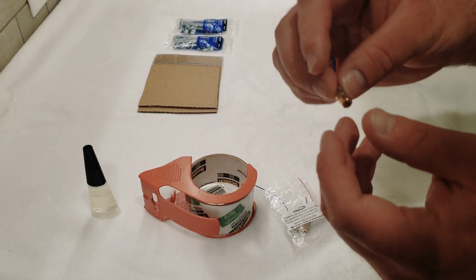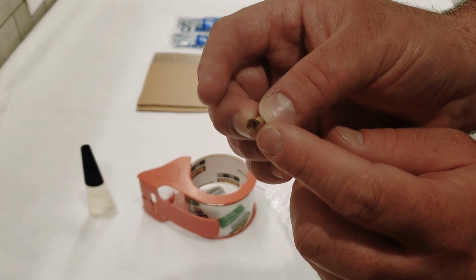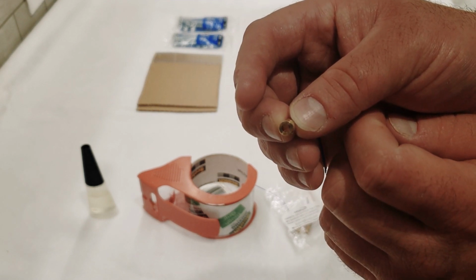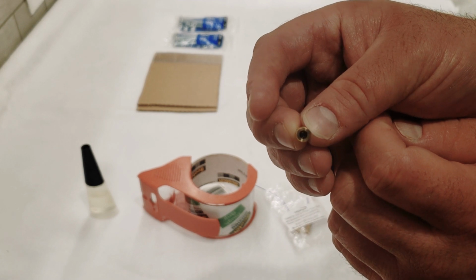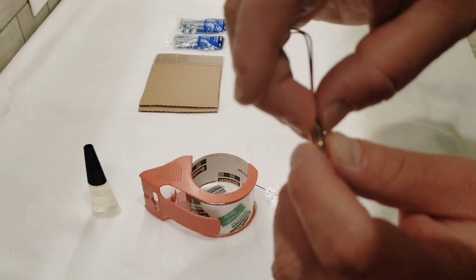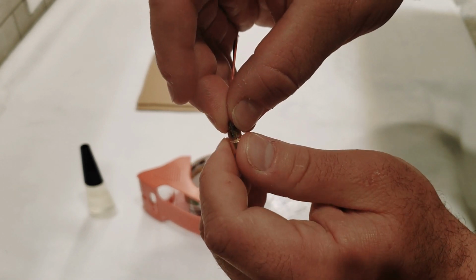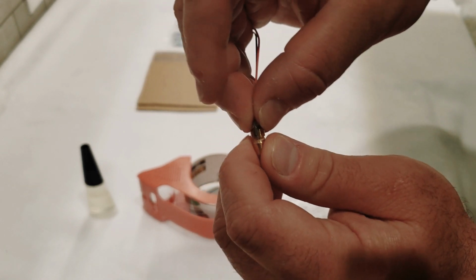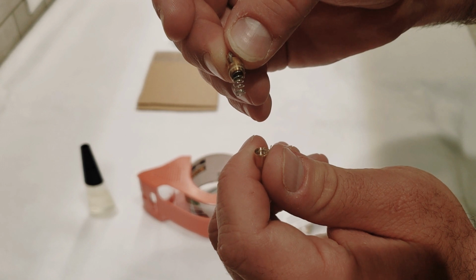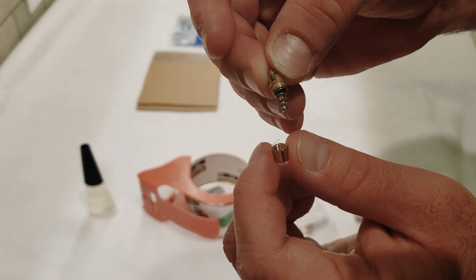So on a lot of them, I actually had to break the metal around here to get the lens out. And a lot of the times that would scratch the lens, which obviously is not great for the purposes of using it for a microscope. But these ones I actually found you can just twist and they will unscrew. So these ones are actually pretty easy, especially since when we open it, you can see there's a spring in there that sometimes will pop the lens out and shoot it across the room. And they're really quite small, so it's pretty hard to find them if that happens.